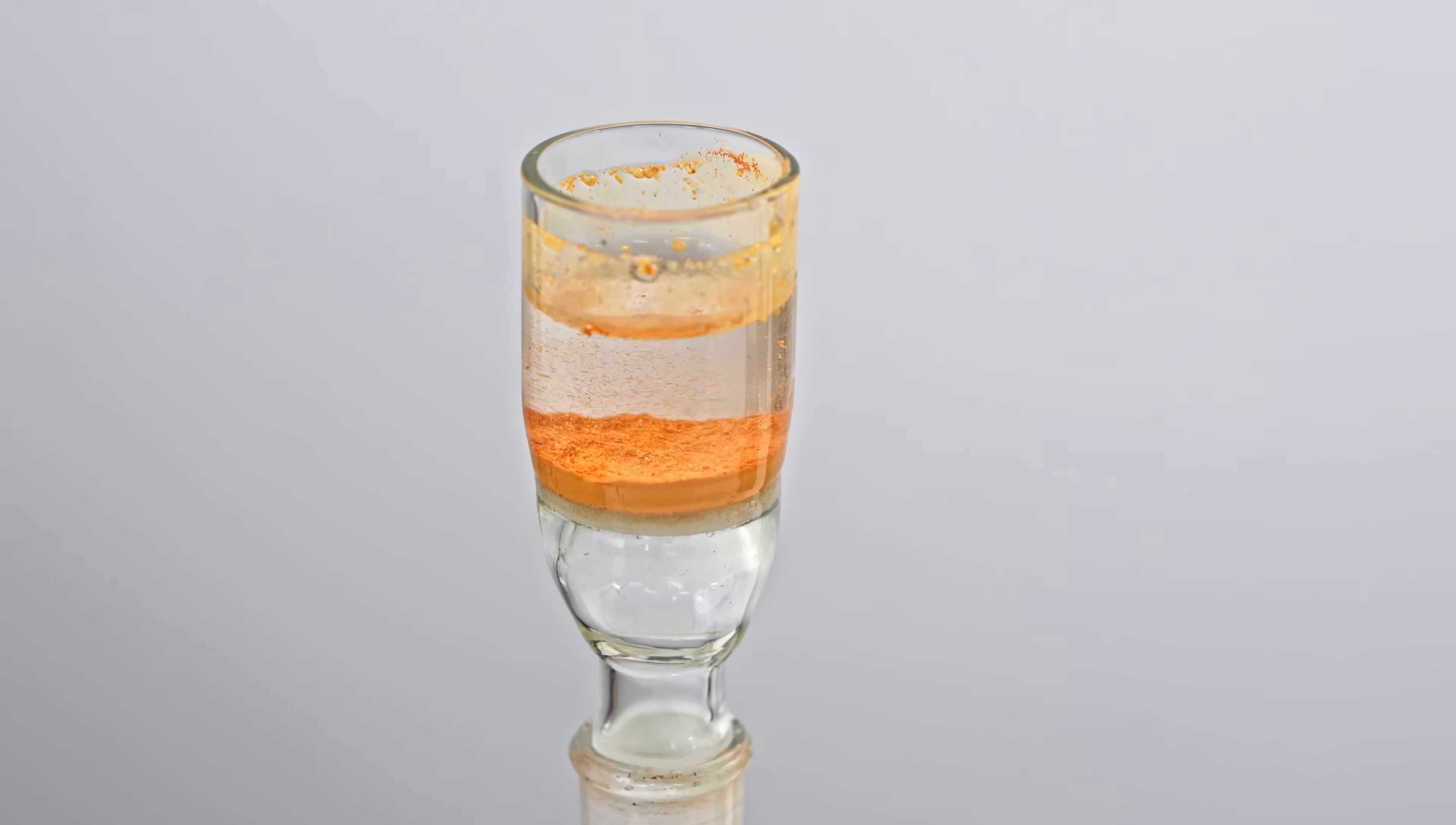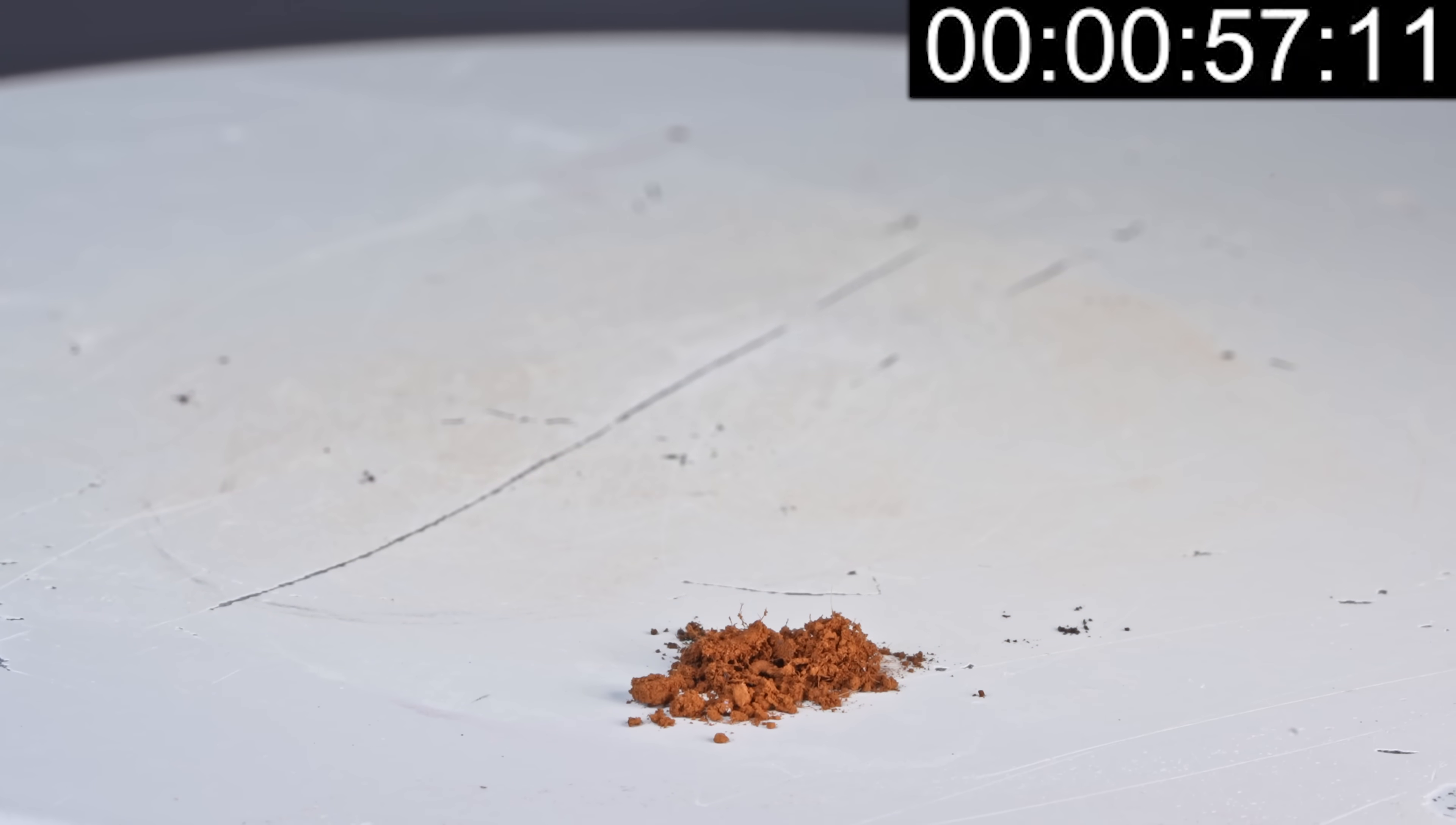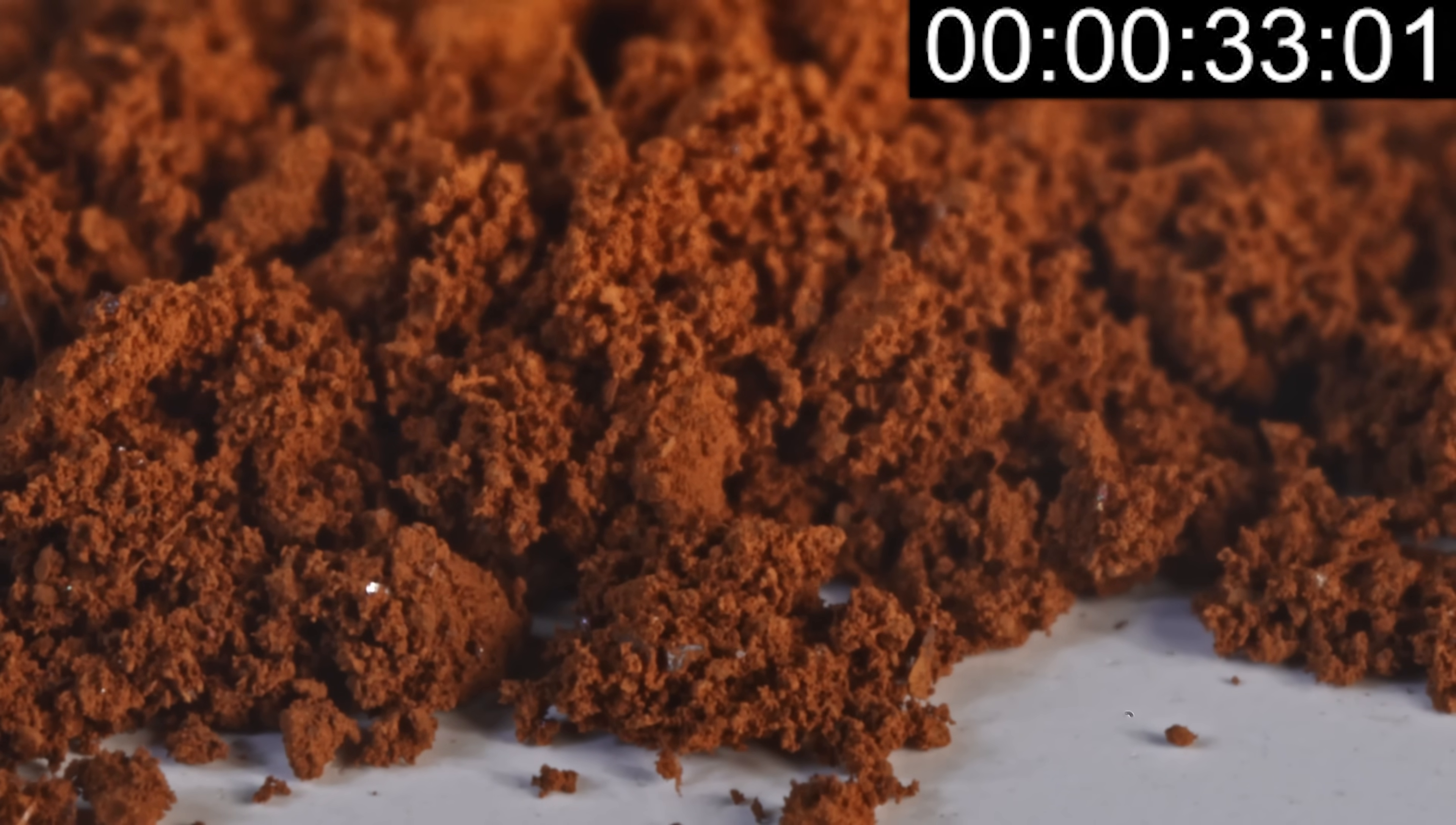Now that we have gold fulminate, let's test it and see that mysterious purple smoke. For the first experiment, I put some of this powder on a hot plate and waited a little. A small explosion occurred, leaving behind purple marks, but the smoke wasn't very visible. Even at 1000 frames per second, or even 12,000 frames, the purple smoke is still hard to see.